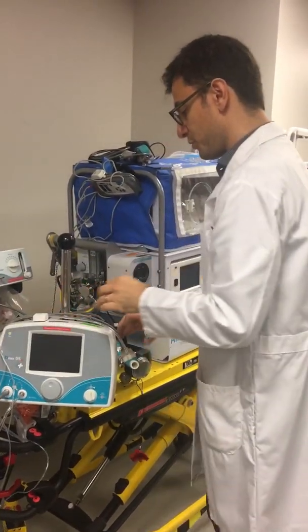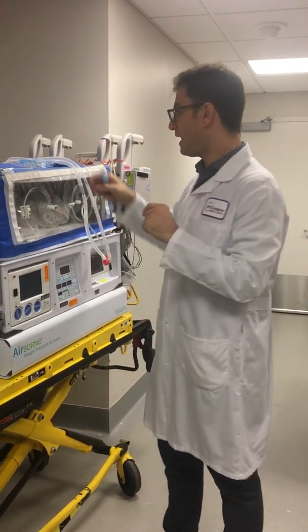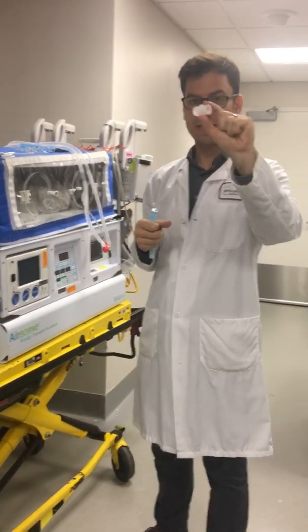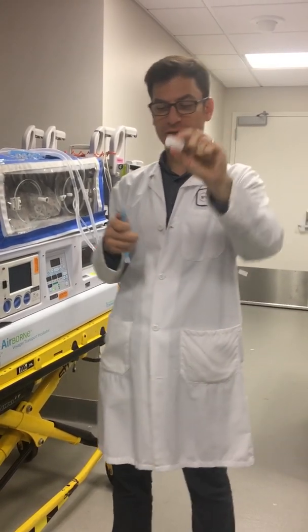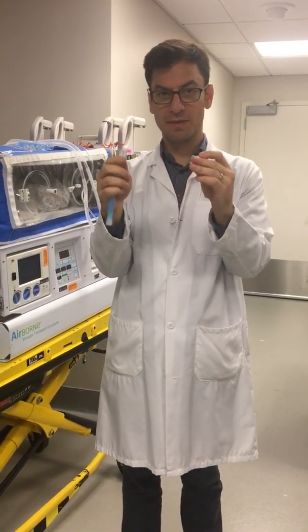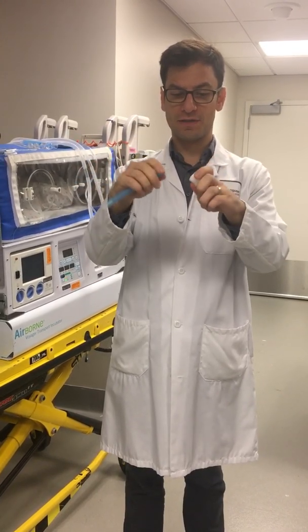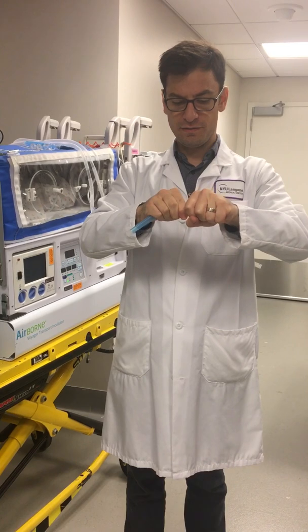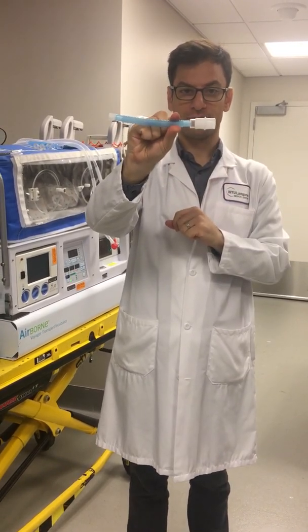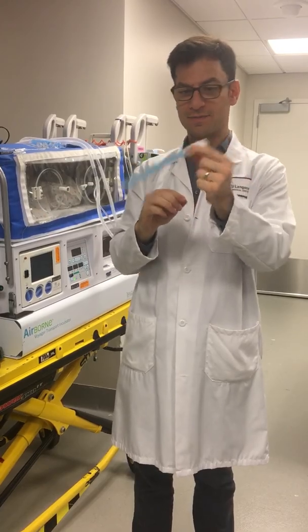What we're going to do is take our first short piece and connect a white 15-millimeter adapter to it. This goes inside the white adapter — you just use a little bit of pressure and angle it in like so. Now this white adapter connects right into here.